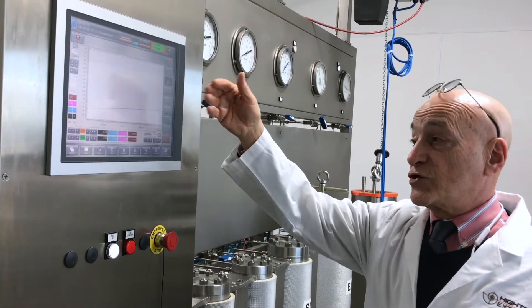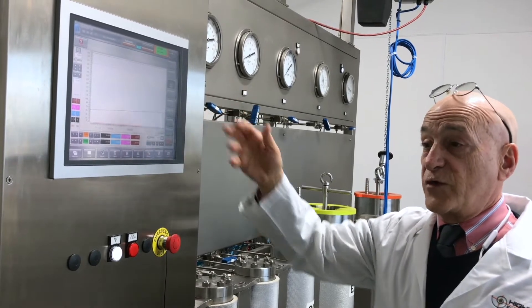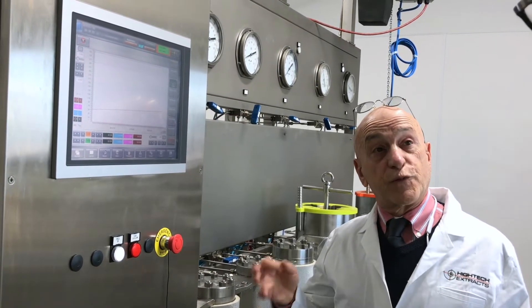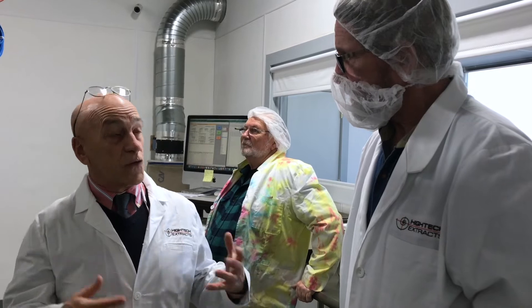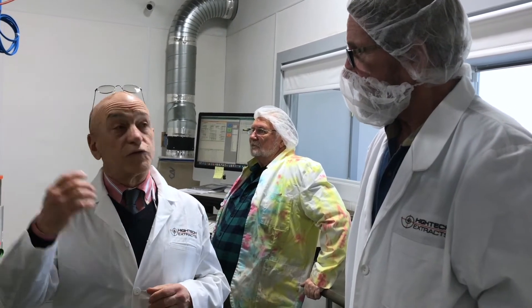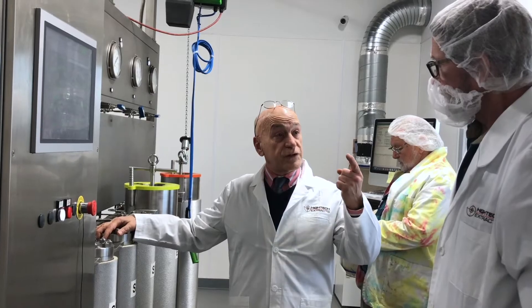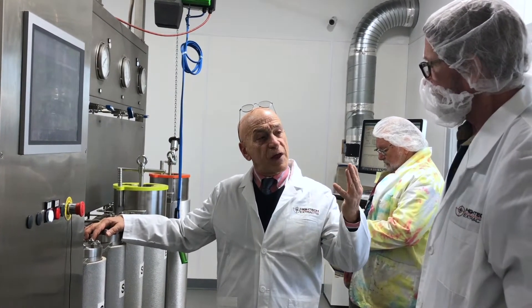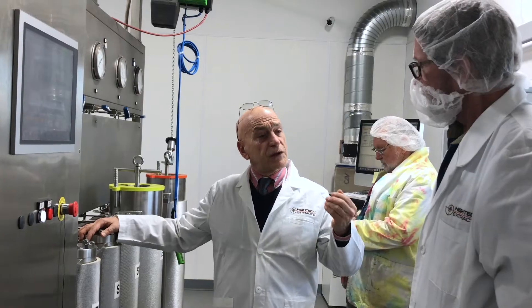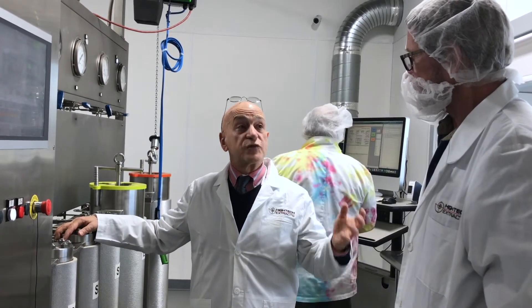Alarms show you the status of the machine and any problems going on. The recipes screen is where you load in your recipe — you can have an unlimited number of recipes. So if you have a specific process for White Widow, which is what we're running today, you create a White Widow recipe. The main parameters we control are temperature, pressure, and flow. There's also time — the flow and time are related, but the time determines how long you run it at a particular setting.